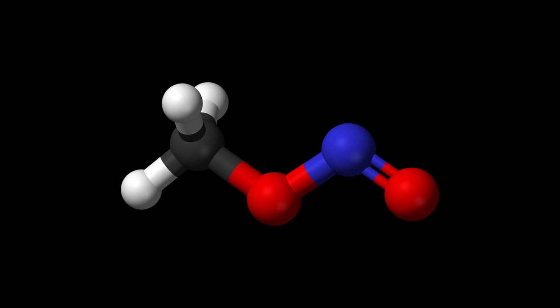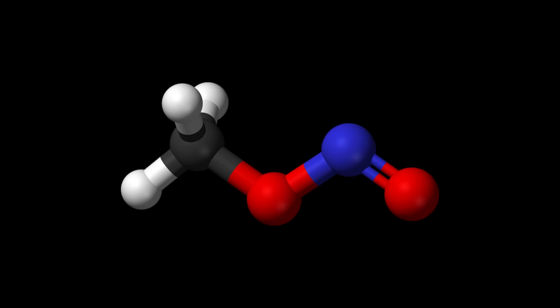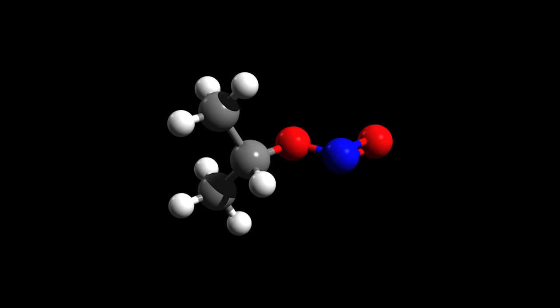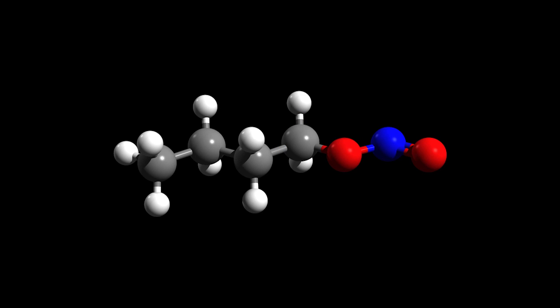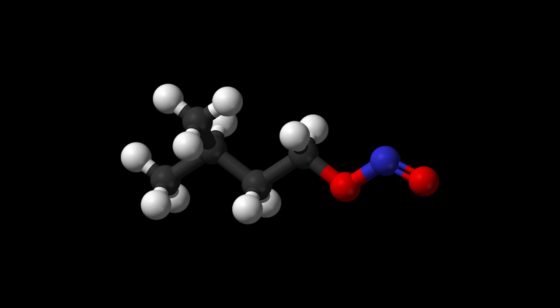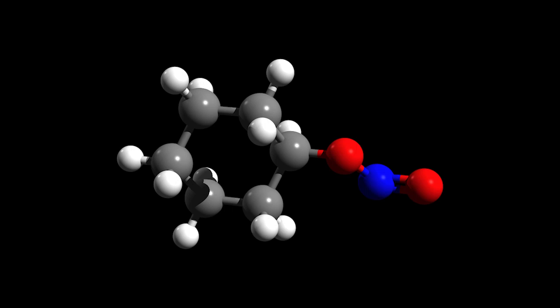Now, here is methyl nitrite, ethyl nitrite, isopropyl nitrite, butyl nitrite, isobutyl nitrite, amyl nitrite, and cyclohexyl nitrite.